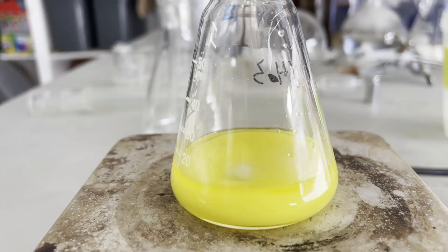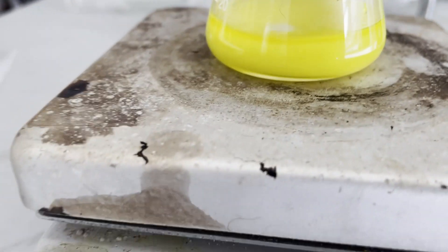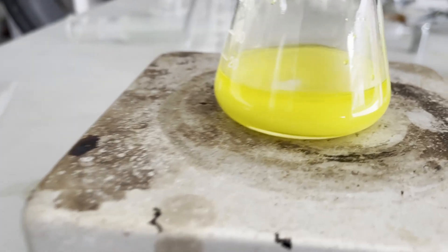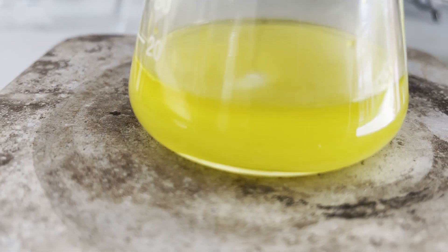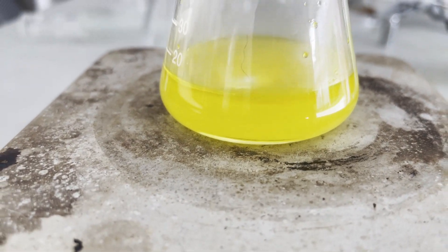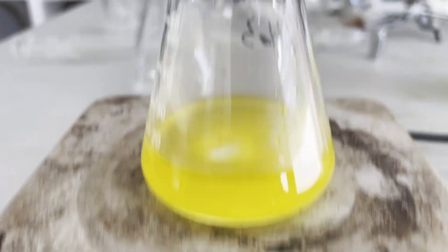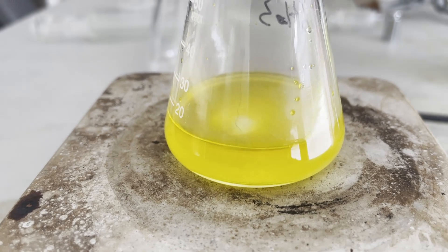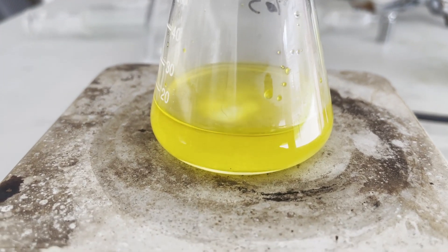The first stage was obviously it turning a very neon yellow. From there, the triaminoguanidine seemed to not really dissolve into the solution, but it became a really, really fine precipitate. Very soon after, you can actually see it on video right here — it all dissolved into solution and became a clear neon yellow. At the end of the 30 minutes, some of the product crashed out, but obviously not in very high yield.